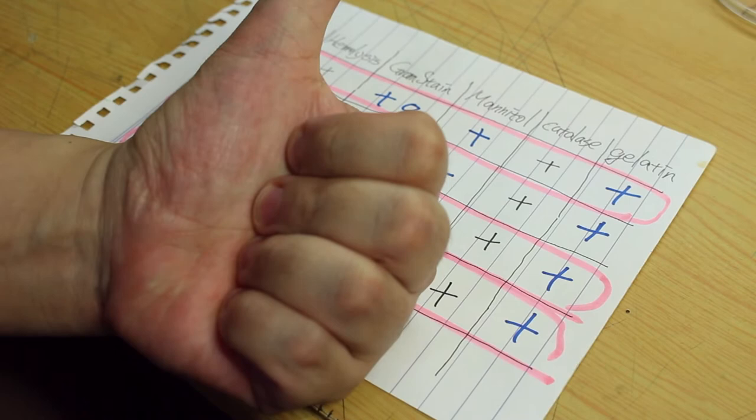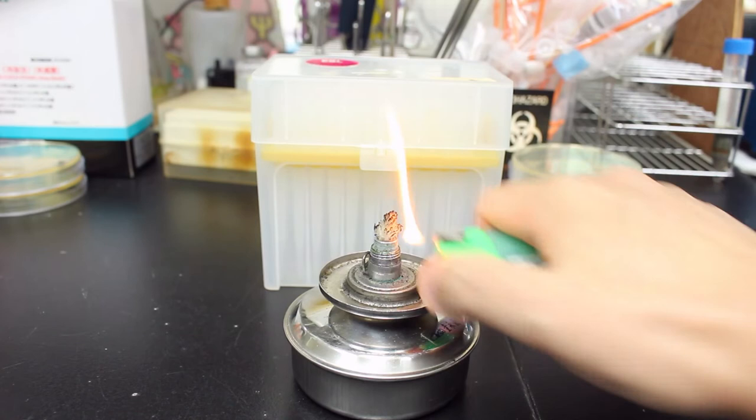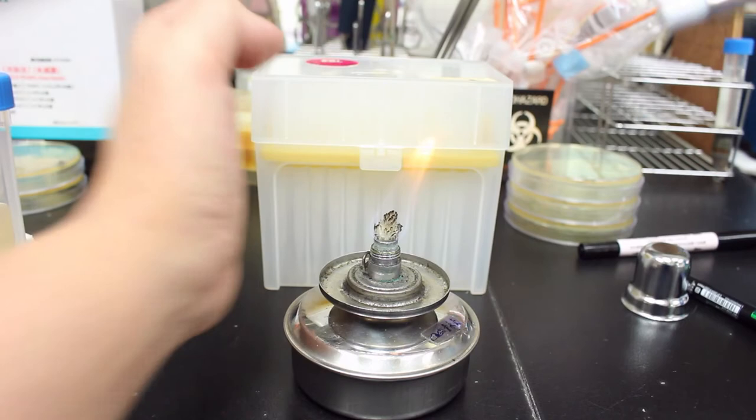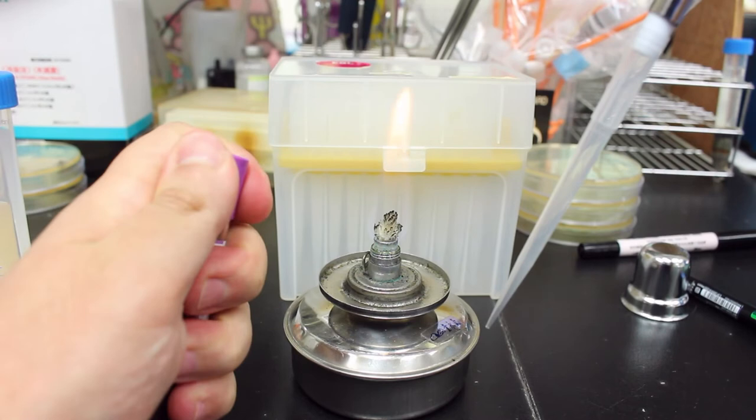It's called coagulase test. It is a very important test used to identify S. aureus. The reason why I put it in the extra is because this test requires plasma to work, which is not very DIY friendly material. Normally we use animal plasma like rabbit, but in here I use human plasma.